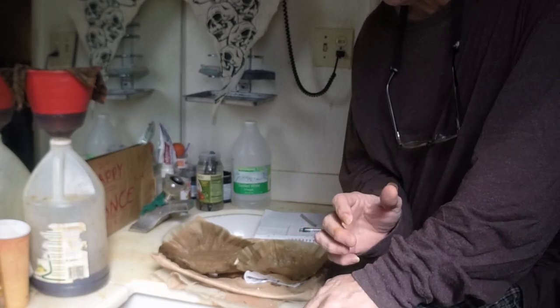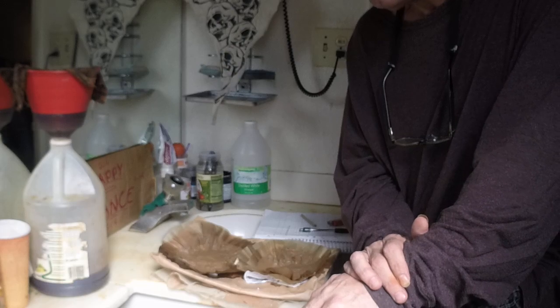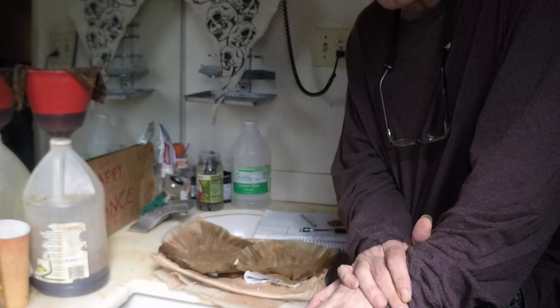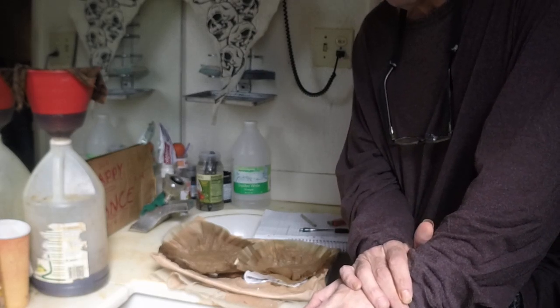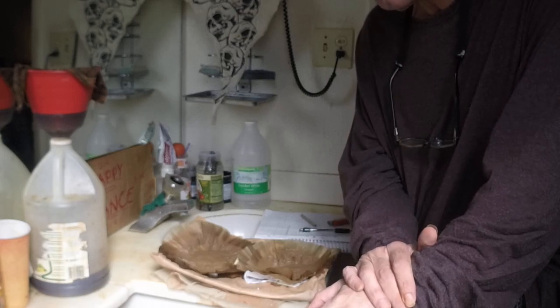So instead of bicarbonate, it's carbonate — that's all there is to it, it's that simple. I do like two hours in a toaster oven at 450 or whatever, and that's usually just fine to make my sodium carbonate.